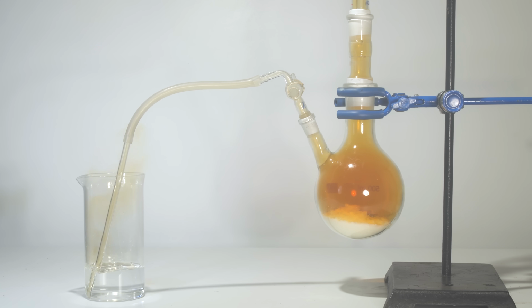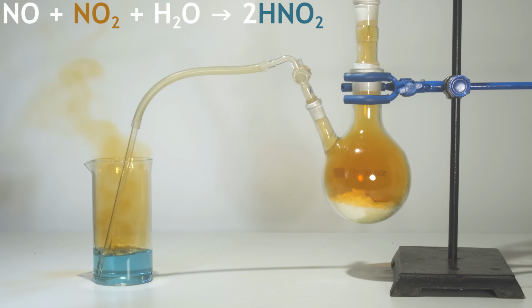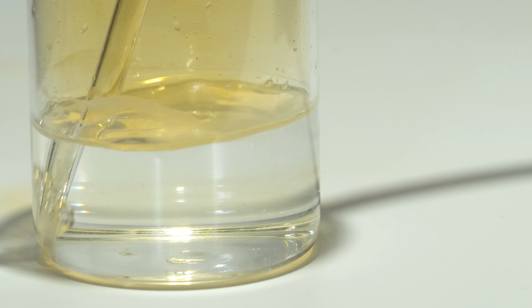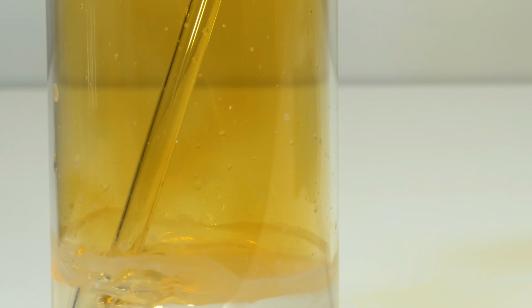When passing the nitrogen oxide mixture through perchloric acid at this concentration, the solution turned blue, indicative of nitrous acid, but no nitrosyl perchlorate precipitate formed. I stopped the reaction and replaced the 50% perchloric acid with a more concentrated solution, close to 70%. After some time, a noticeable amount of a white substance accumulated at the bottom of a beaker.